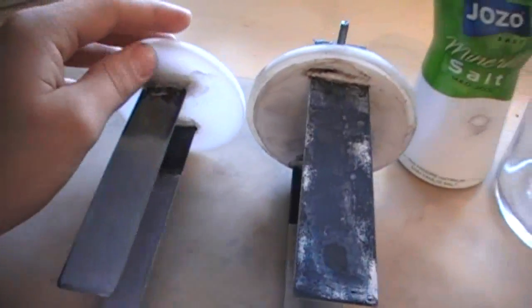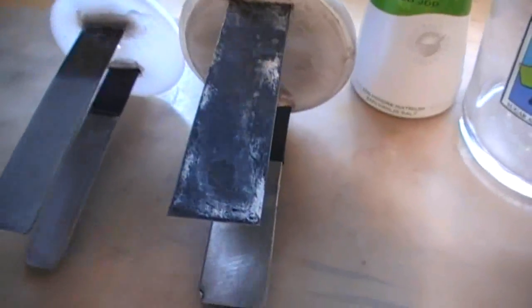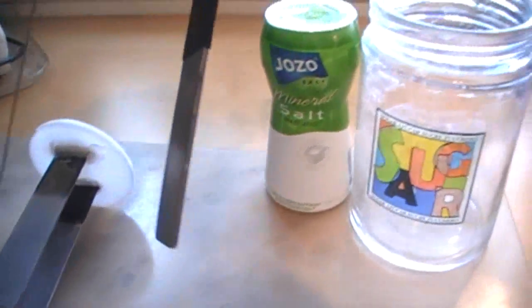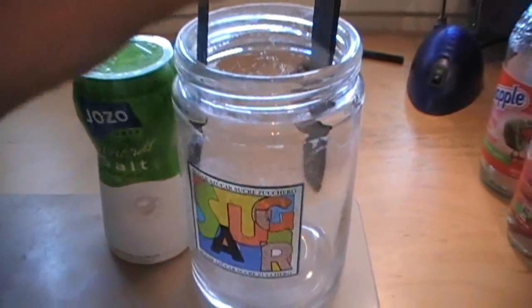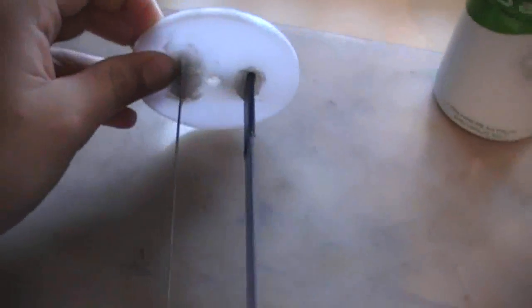I have made two here. This one is a little bigger for my biggest cell and this one is for a little small one.